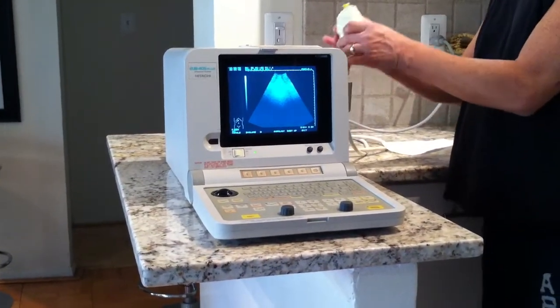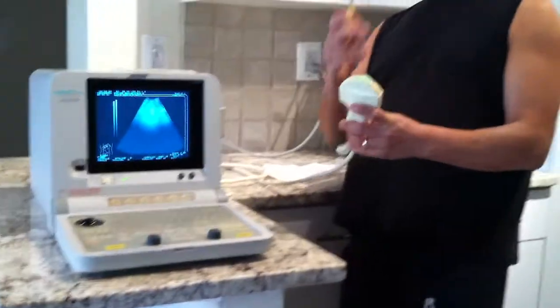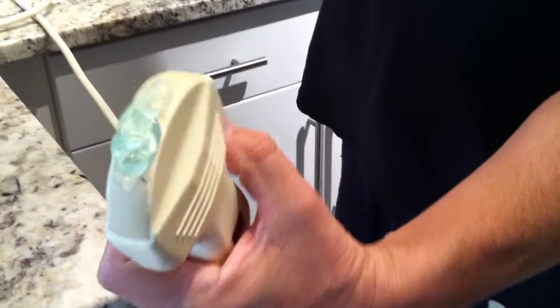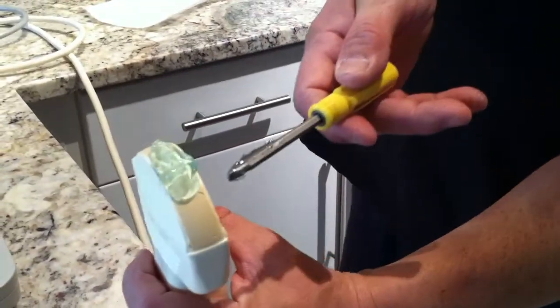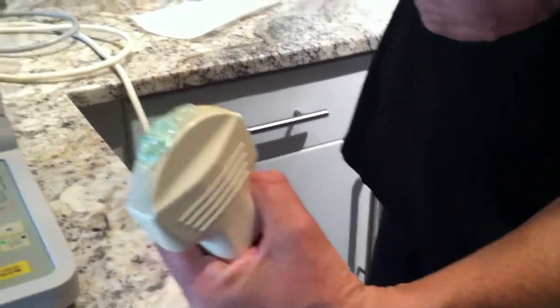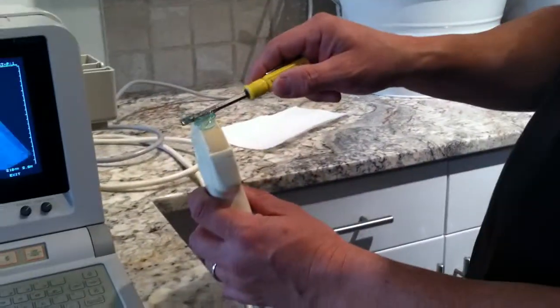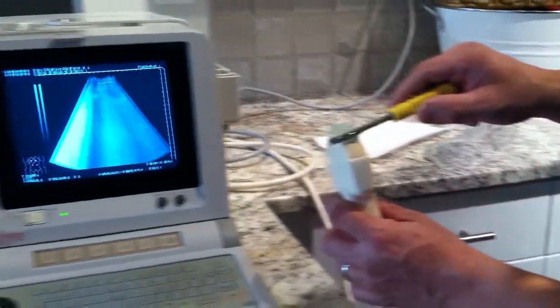I have just put some gel on the probe. Could you come here, assistant, and show the gel on the probe. It's got a little nick there, but that shouldn't affect anything. We want to know whether that nick has affected the elements, so we have to go like this.